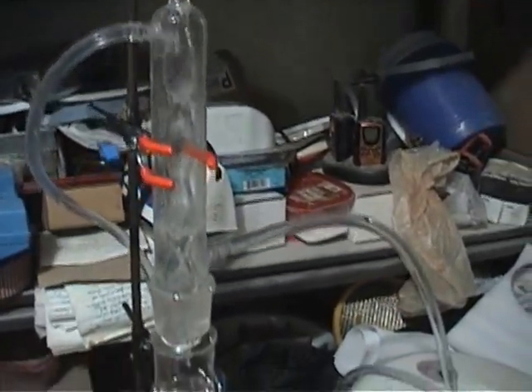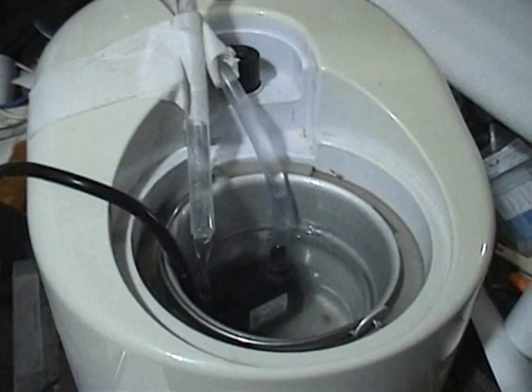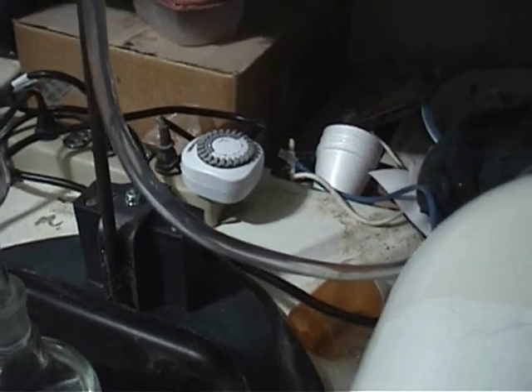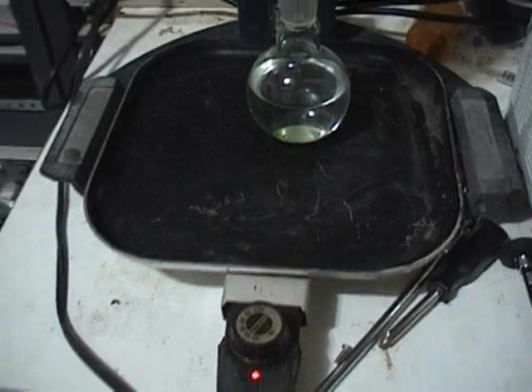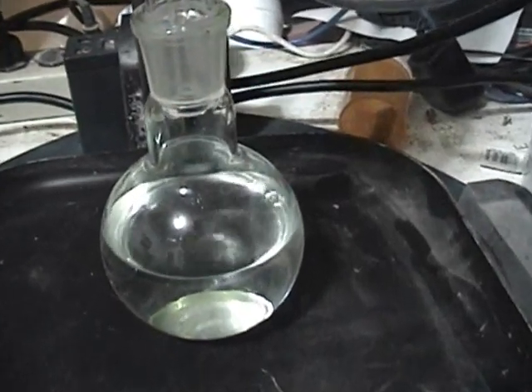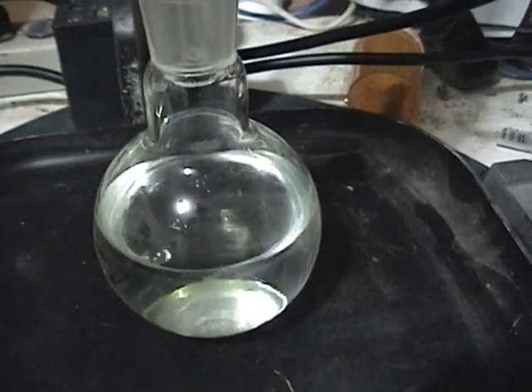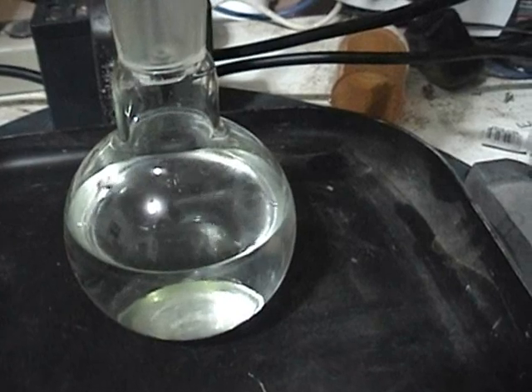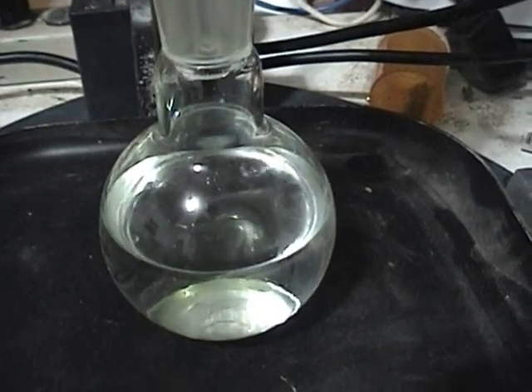There's the extractor body and condenser body. I have my old standby ice cream maker as my water reservoir, set on a timer back there at a fifty percent duty cycle — on a half hour then off a half hour — to keep the water from getting too frozen. The electric skillet just came on. I wish I could get a little more heat in there and get more vigorous boiling. There's a little bubble activity in there that's interesting to watch. I'll keep doing videos every hour or two or three to see how it goes.